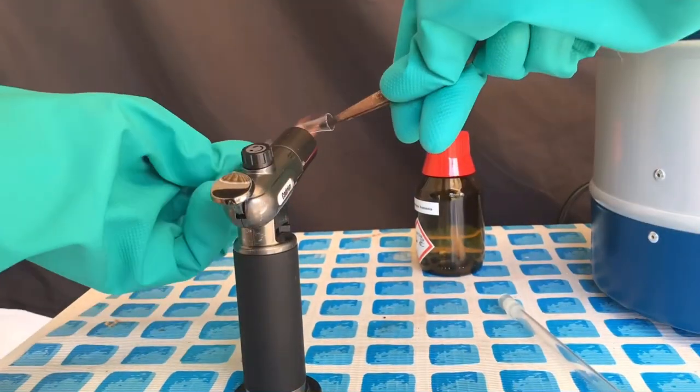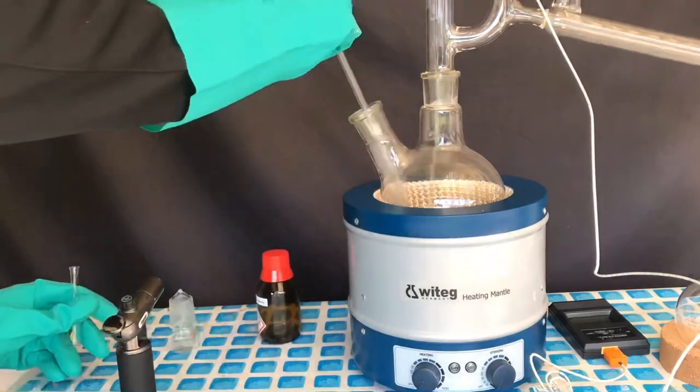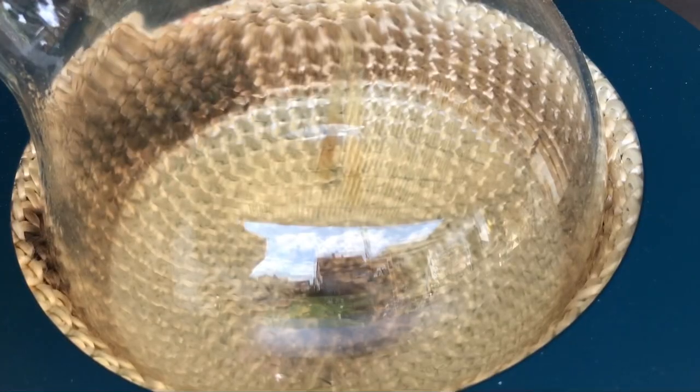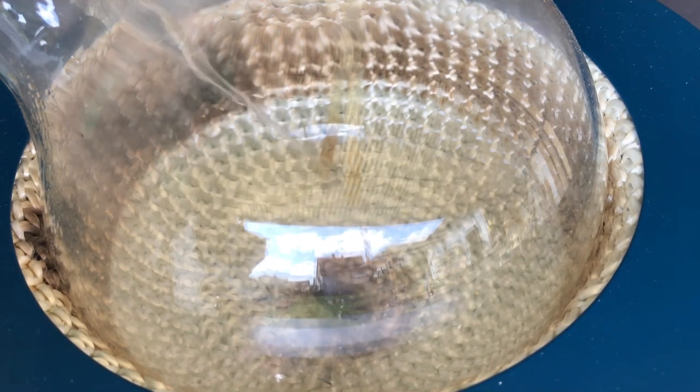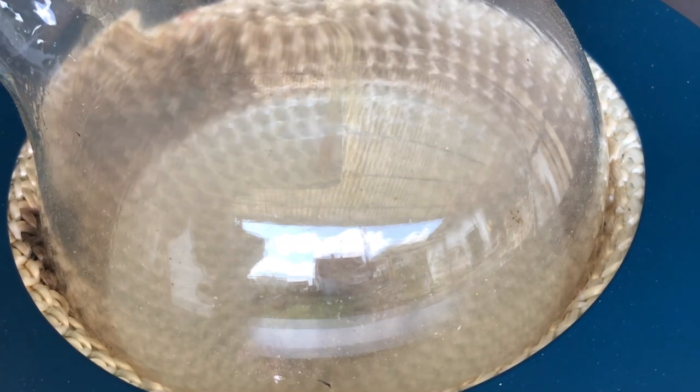I really need to get some new gloves because I ran out and had to use these. To neutralize the material left in the apparatus, I decided to add some water. After adding the water, you can already see a lot of fumes — the fumes consist of hydrochloric acid, phosphoric acid, and sulfurous acid. To make disposal safe, everything was neutralized afterwards using some sodium carbonate solution.